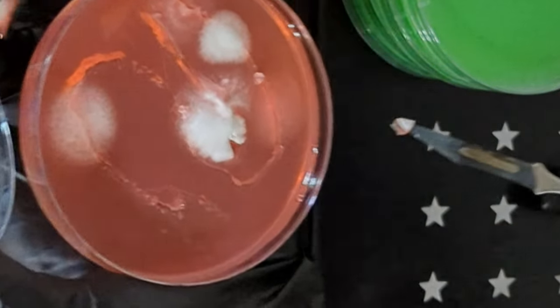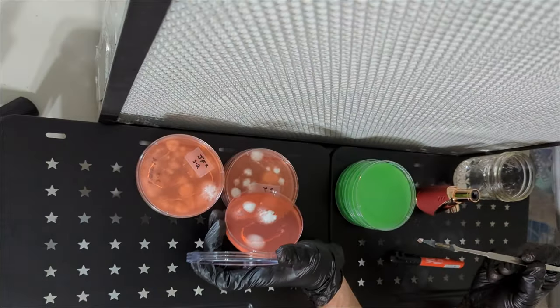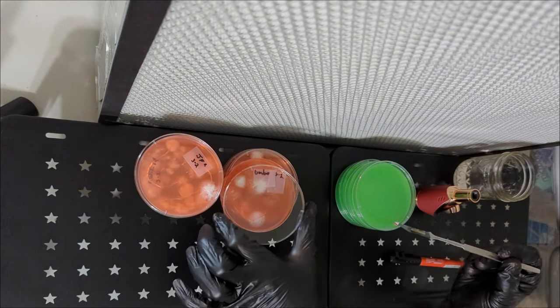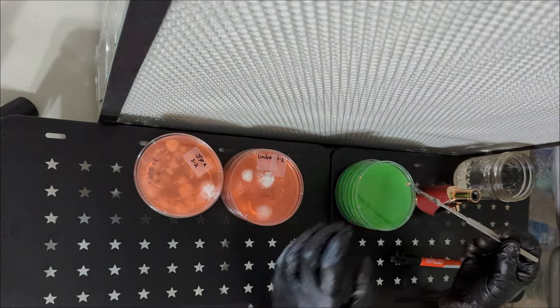If you're going to run one culture per plate, it is best to put the subculture right in the middle of the new plate so it has the most space in each direction to grow.